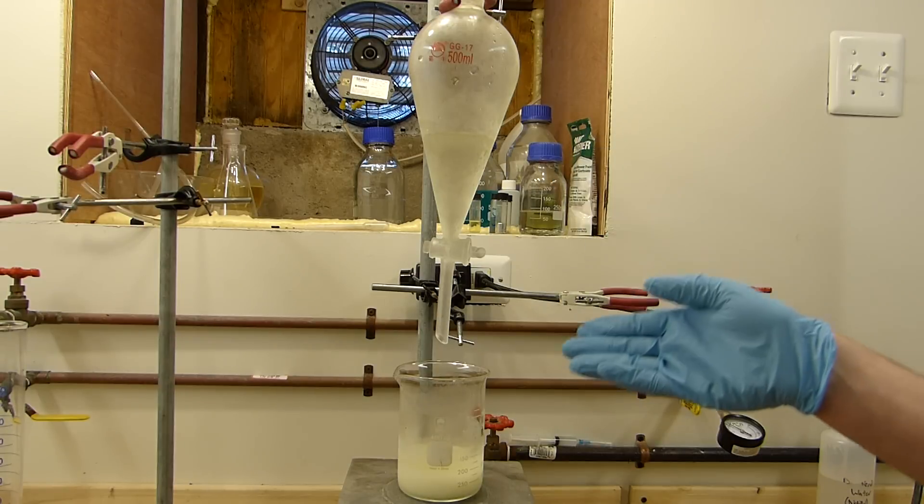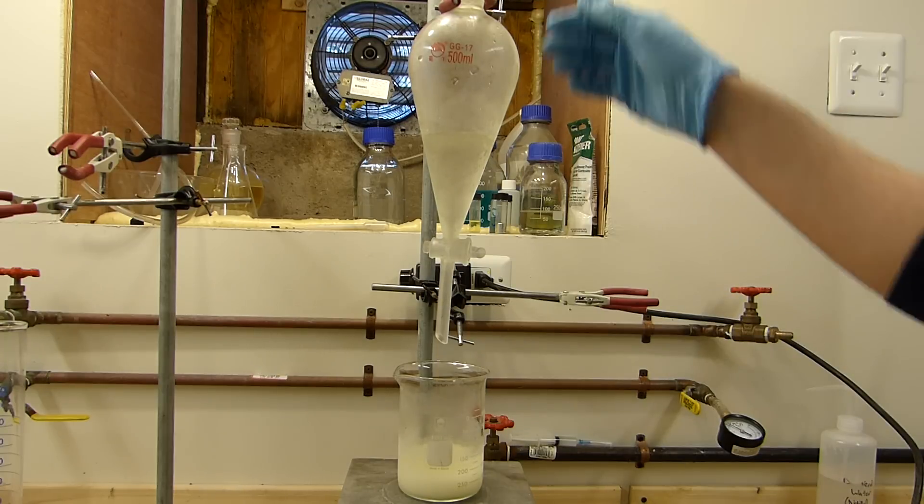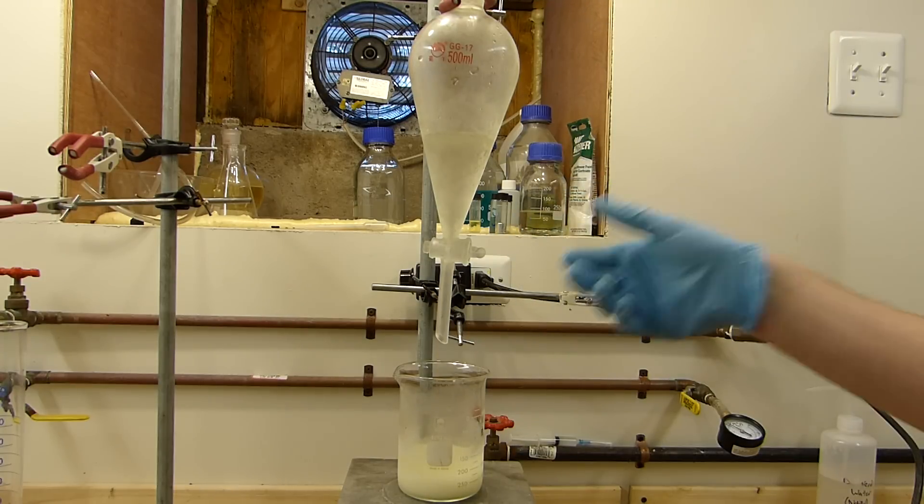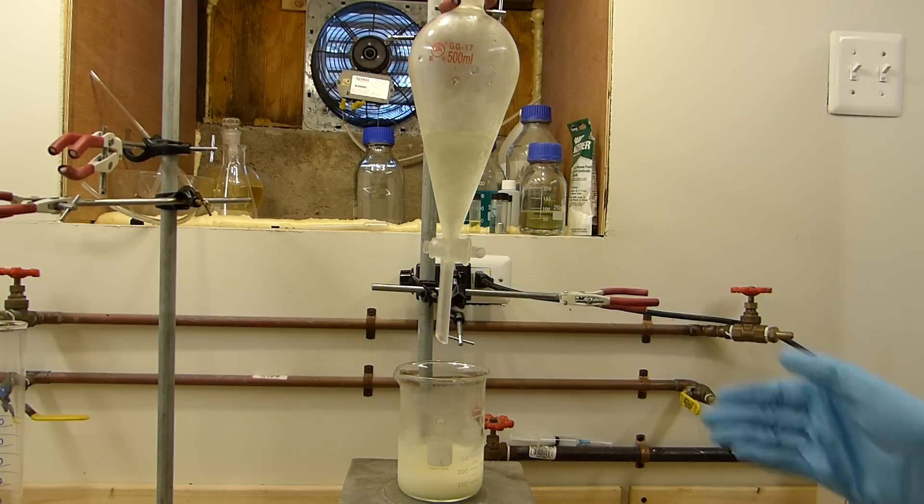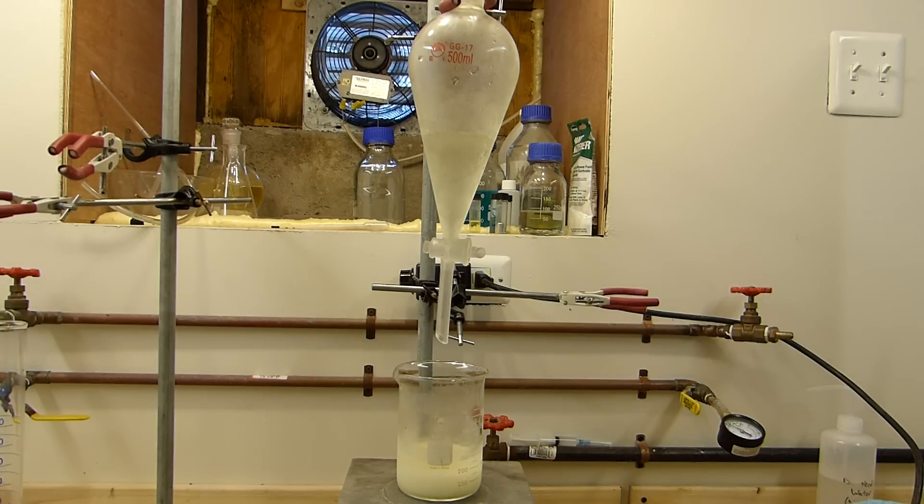So I've set up the reactants out of the freezer. I've removed the stopper, or at least engaged the vent at the top of the addition funnel to allow me to equalize the pressure so I can add the HCl without pressure problems. And we'll add it to a rapidly stirred beaker here of the alcohol and nitrite and we should end up with isopropyl nitrite.